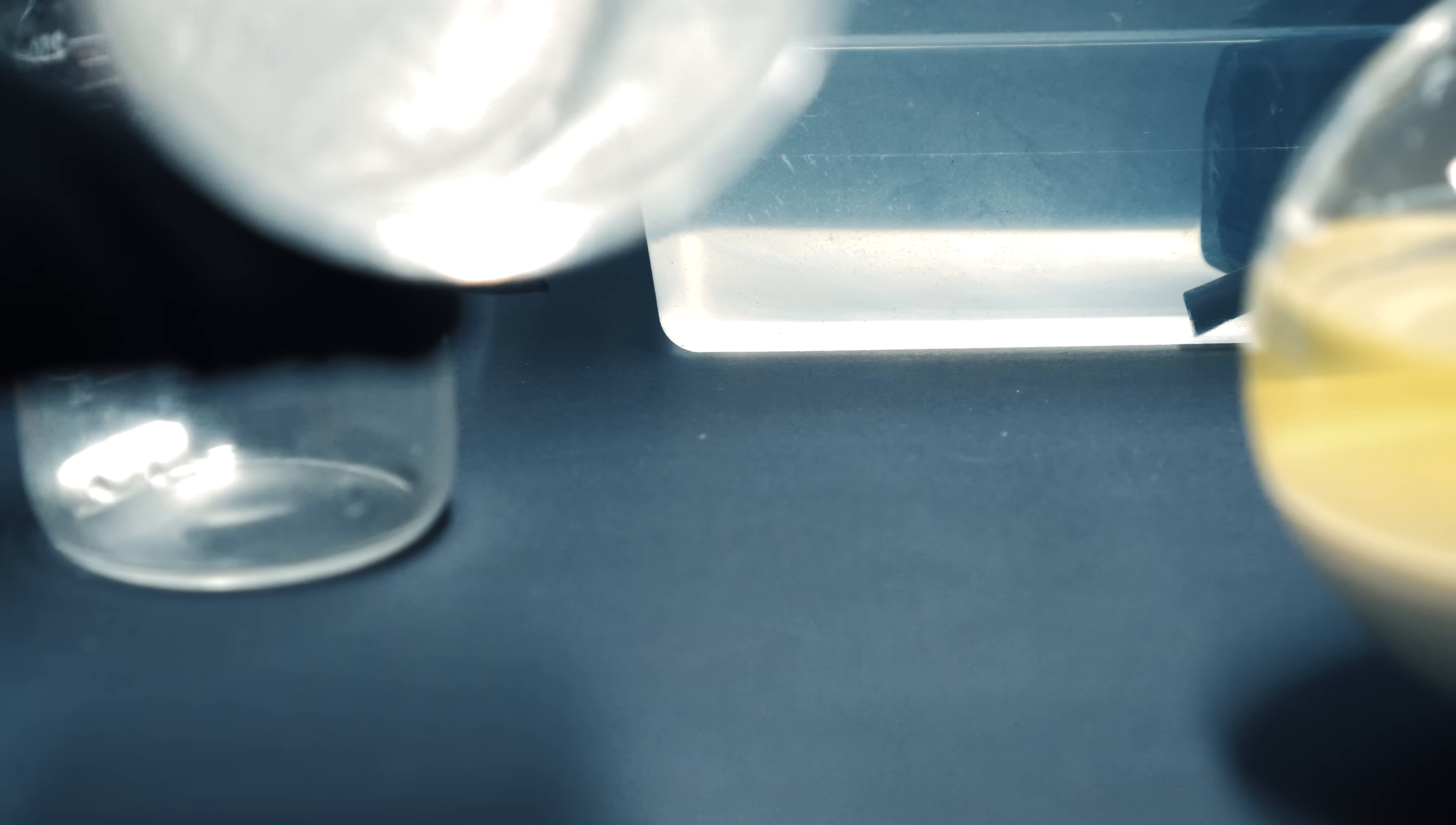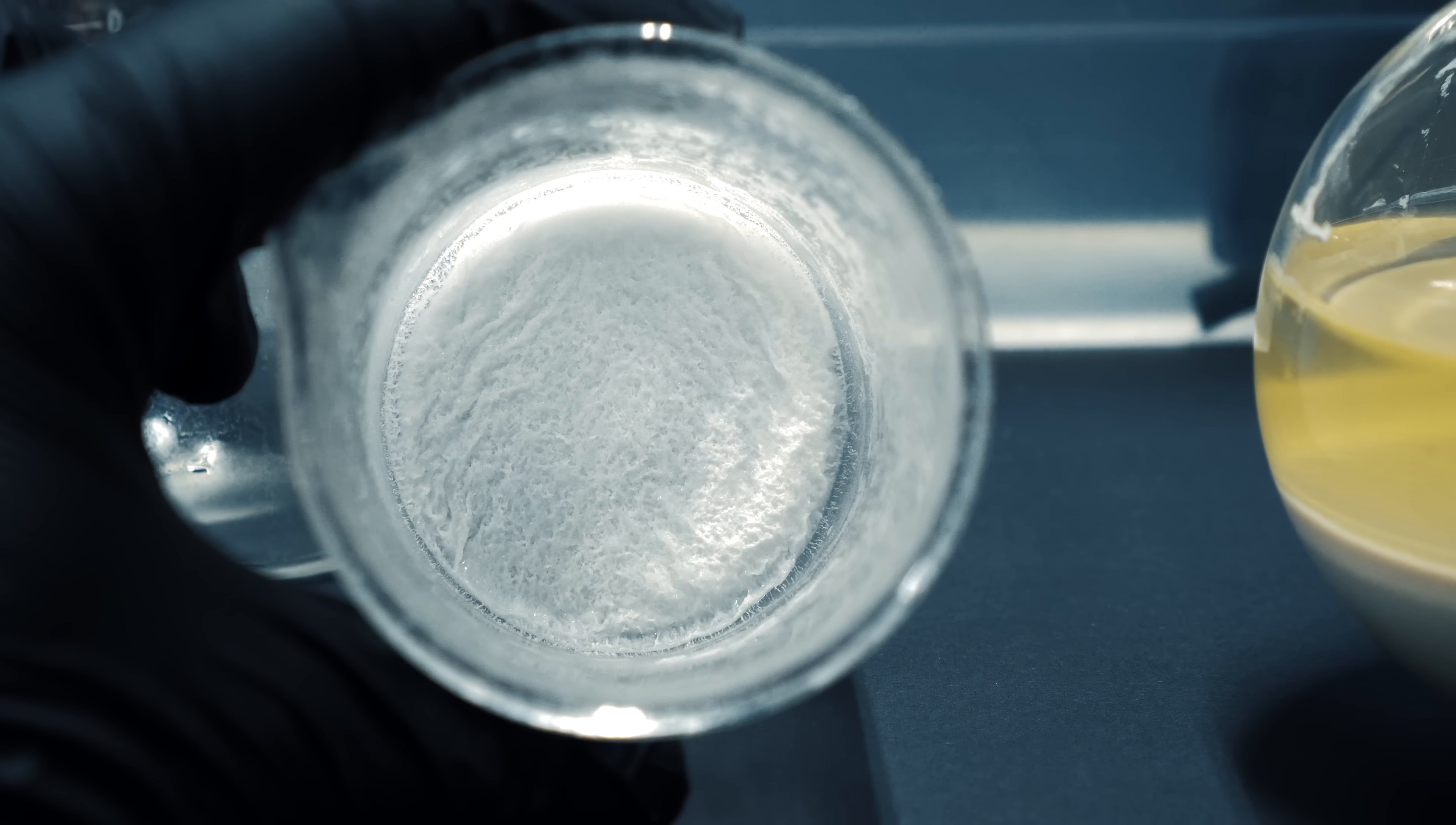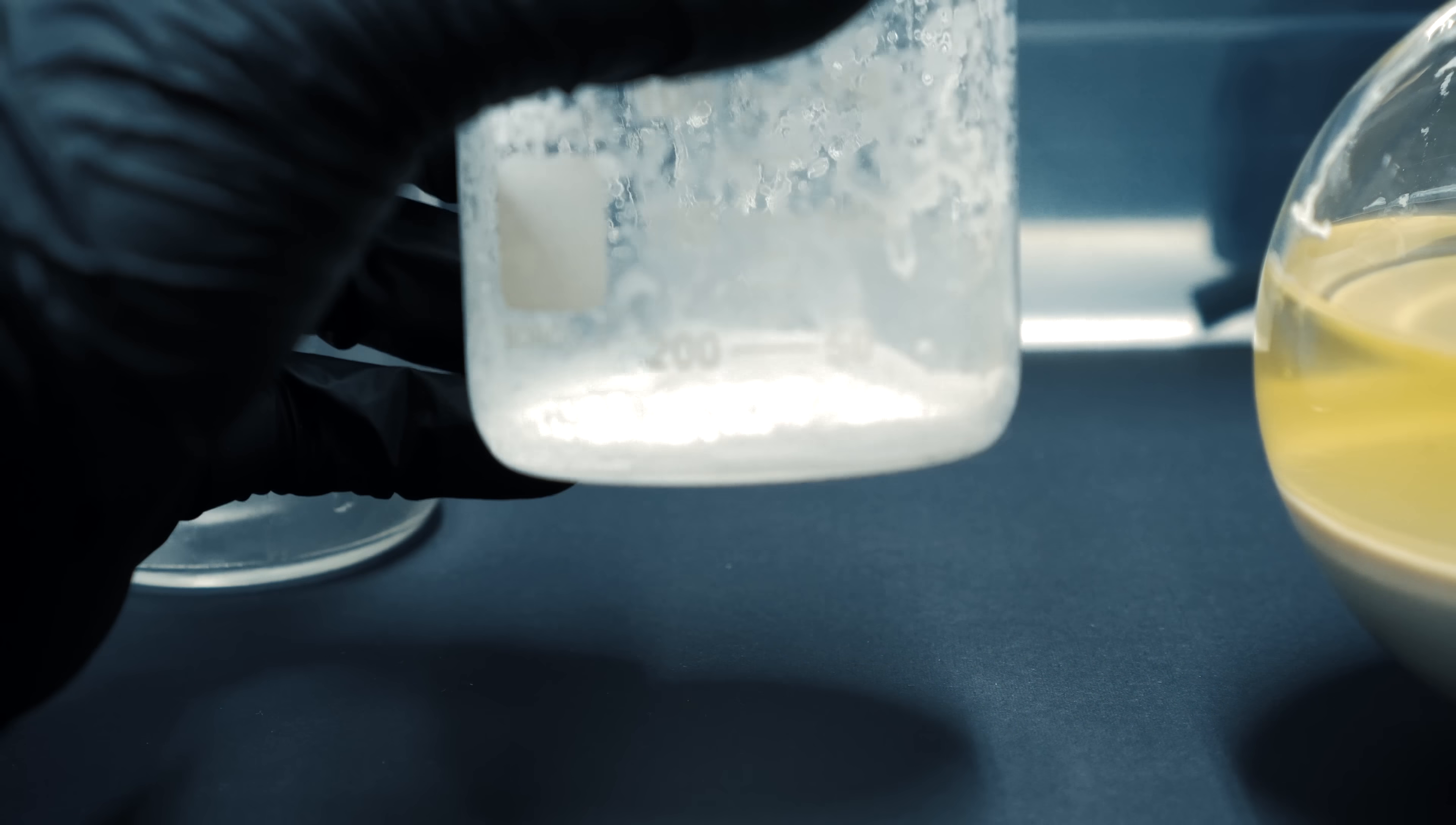I didn't get it on camera, but it was pretty cool. And this is what it looked like inside the beaker. It's this beautiful white crystalline powder and it's pretty hygroscopic. Funny how such a beautiful compound is used in meth manufacturing which kills a lot of people worldwide.